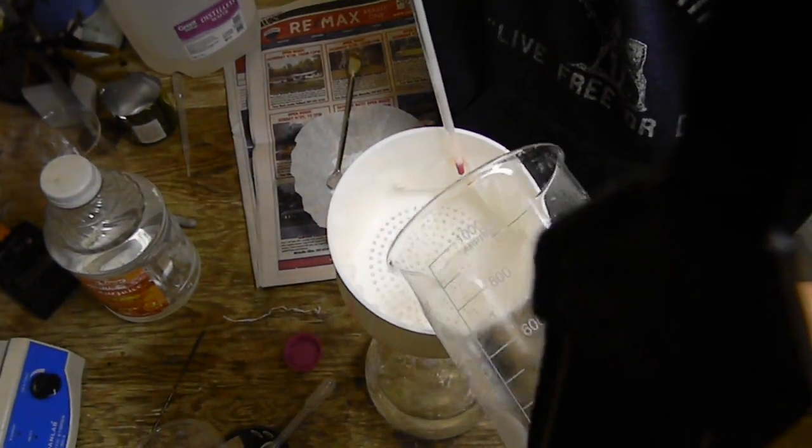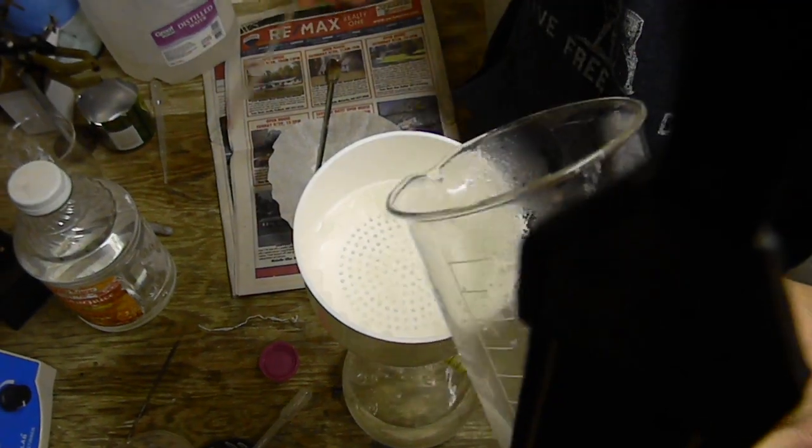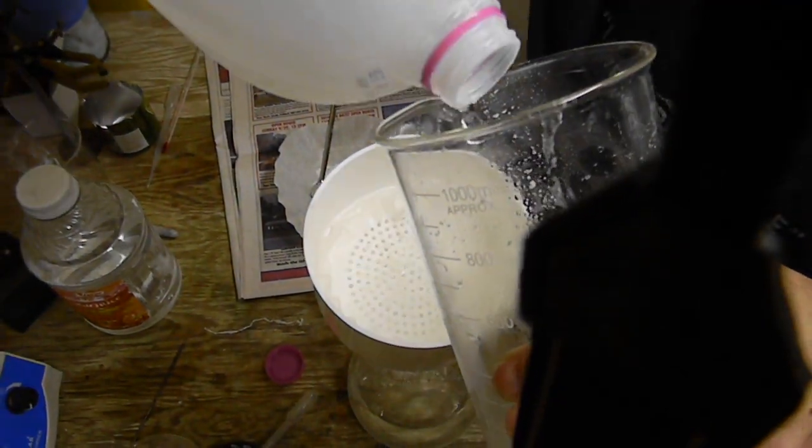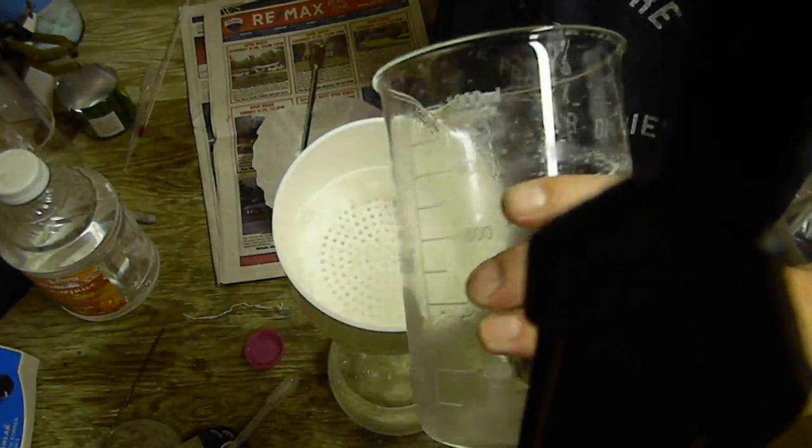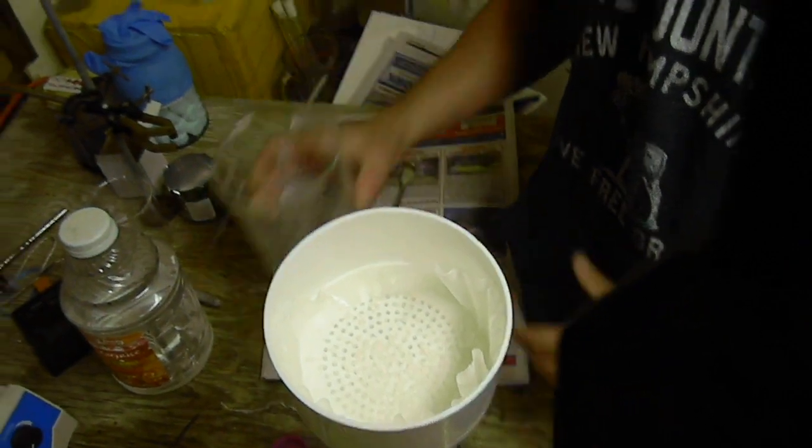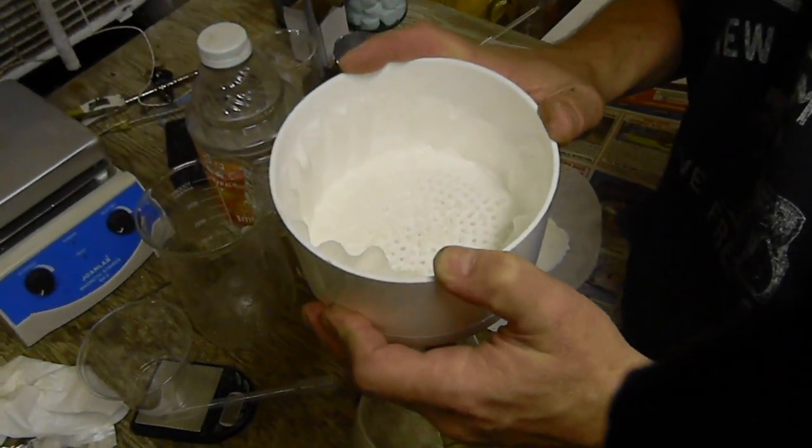Here's the recrystallized product, right there. I just did a little teeny bit because I'm going to set the rest of this off doing something else in a few minutes and I don't have time for it to dry.